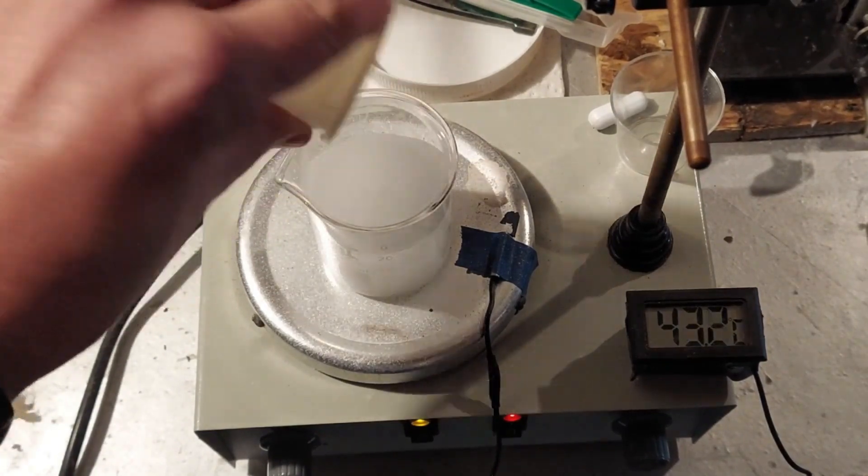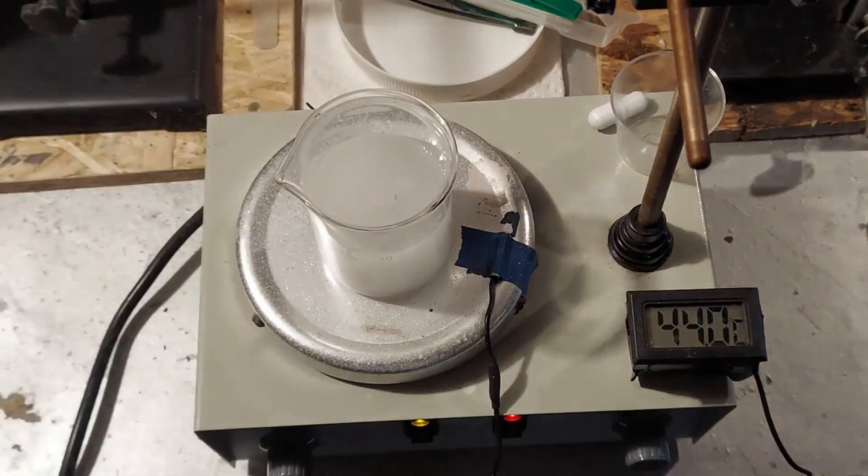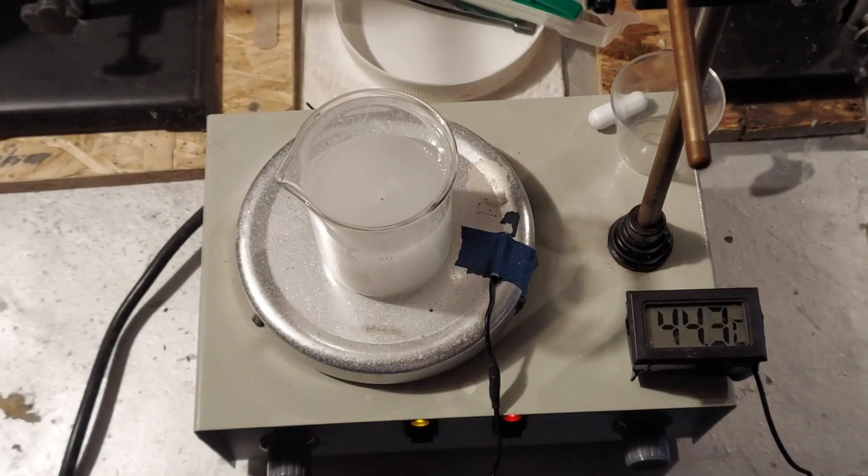I'm going to put it all in there and wait for it to dissolve, which we're not going to sit here and watch. I'll come back when it's dissolved.